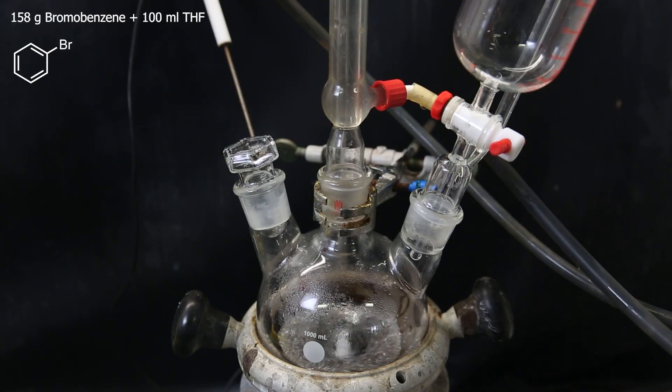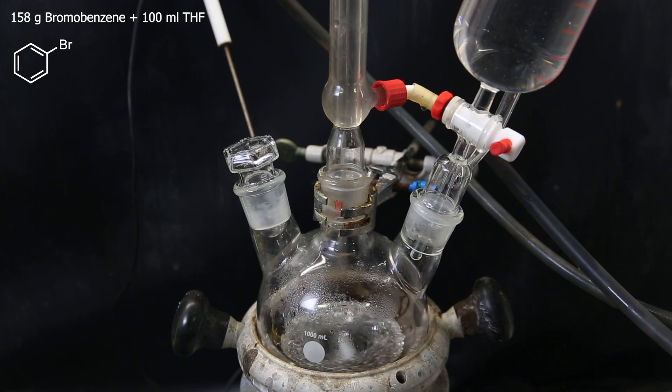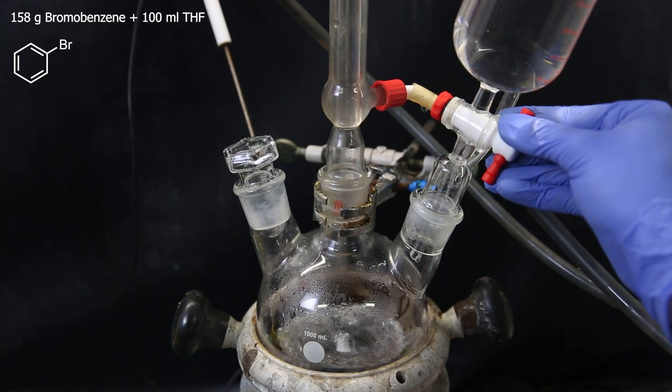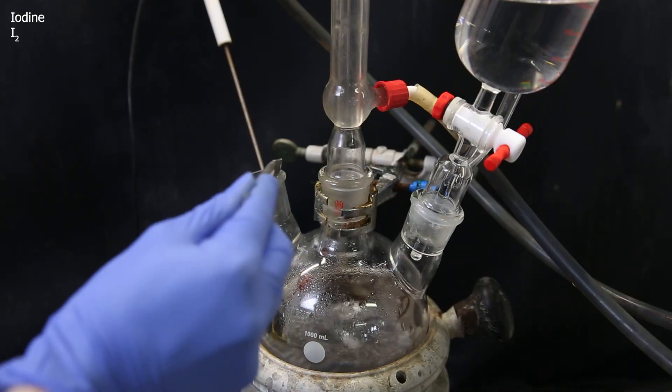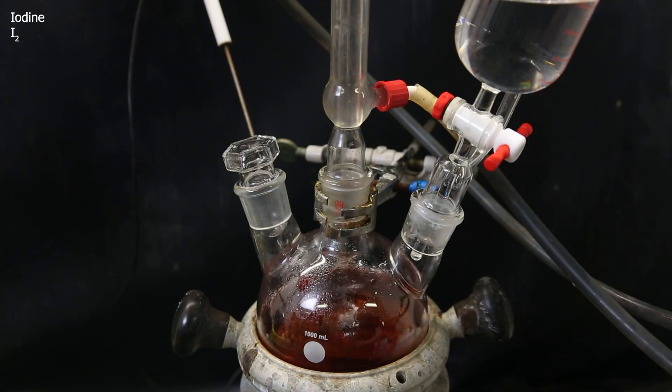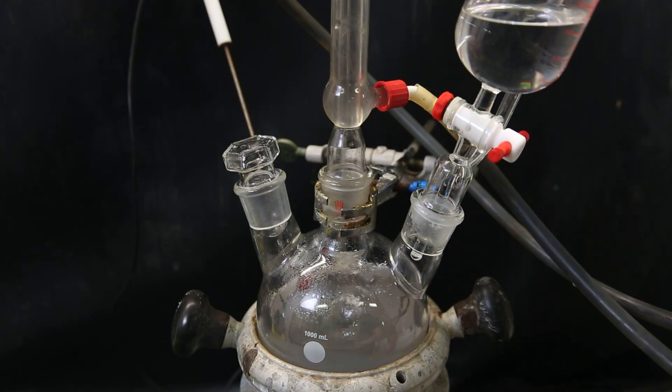Into the dropping funnel, I add 158 grams of the reagent bromobenzene, that I diluted in about 100 mls of THF. I add a portion of it to the flask, and also a small ball of iodine, which will help remove the oxide layer on the magnesium. When the color of the iodine has disappeared, the reaction seems to start, and become darker from the formation of the phenylmagnesium bromide.